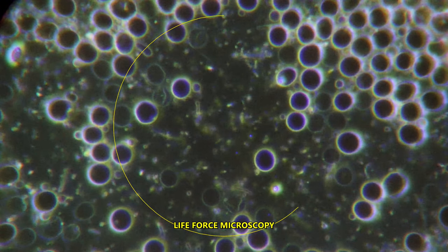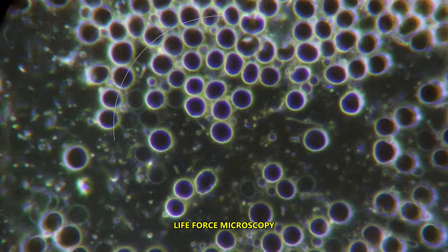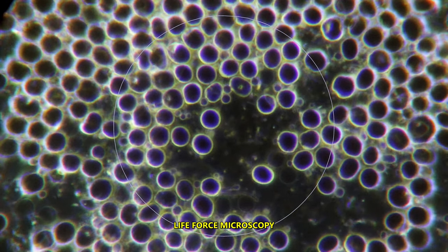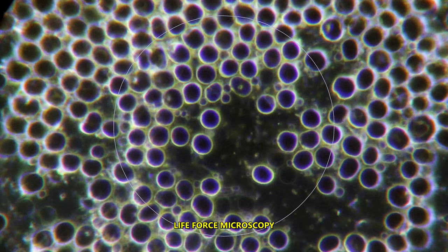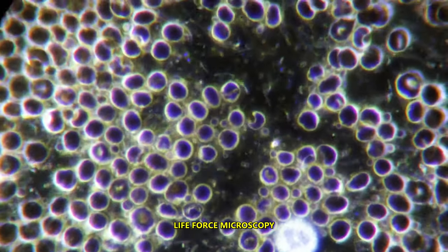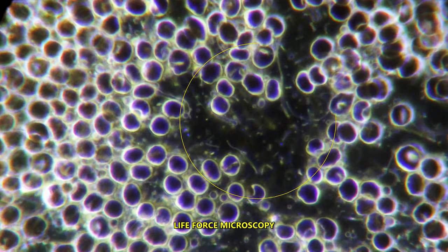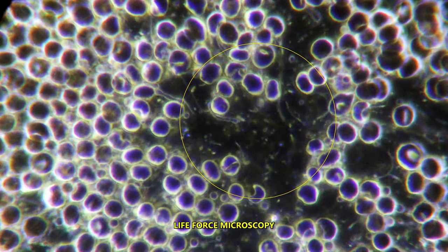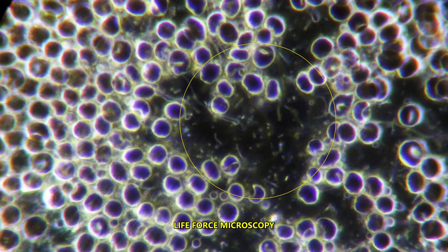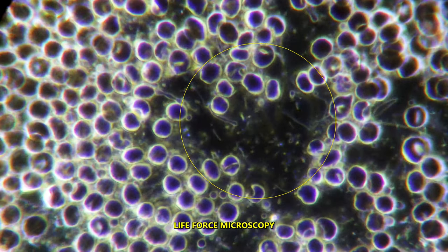Now, for those who say that live blood analysis or dark field microscopy has nothing to do with health and it's just a scam to take money from people — let me tell you that you are wrong. Of course, you have to have a lot of practical and theoretical experience in order to diagnose correctly the health condition of a person.